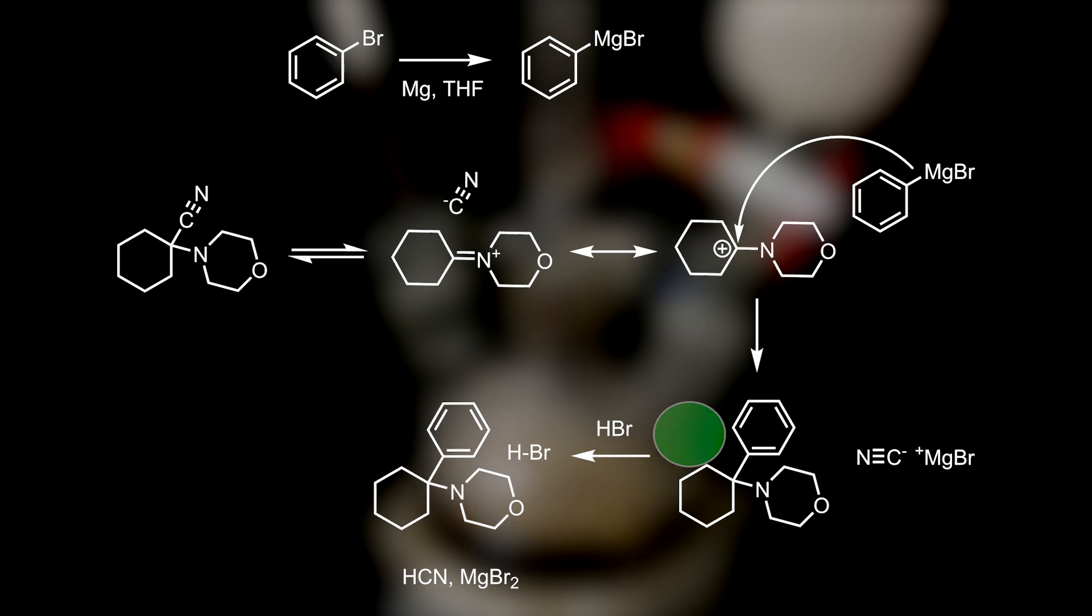Afterward, it is treated with aqueous hydrobromic acid, converting the PCMO into its hydrobromide salt, and reacting with the cyanide to give hydrogen cyanide, which largely bubbles out, and the salt magnesium bromide. Any remaining magnesium metal will also react for magnesium bromide and hydrogen.